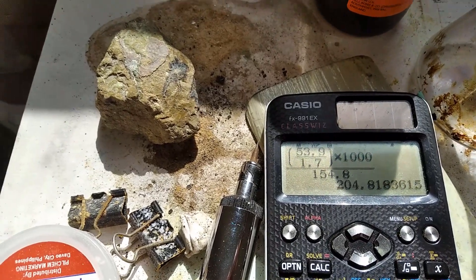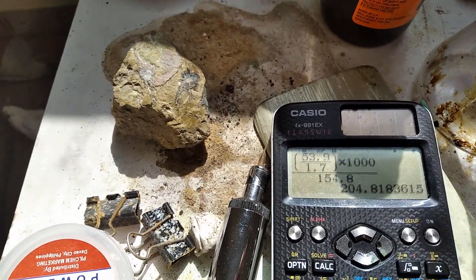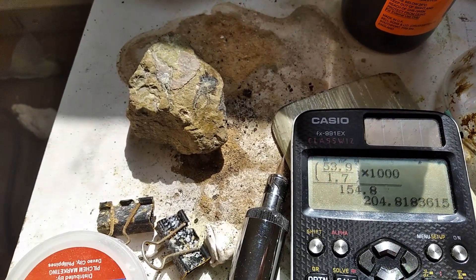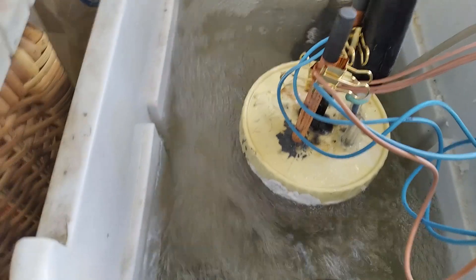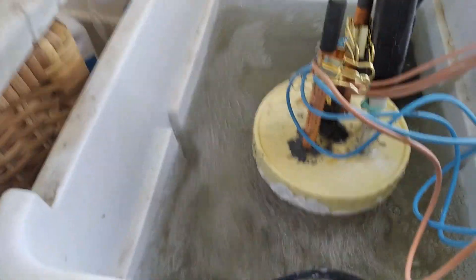It should take about 0.9 days to finish as I checked it in that online calculator, but I'm going to run it for more because I don't know about this efficiency. Cathodes are actually made of graphite because I'm so sick of titanium — it embrittles, it starts bending towards the other side, and it's the most annoying thing ever.